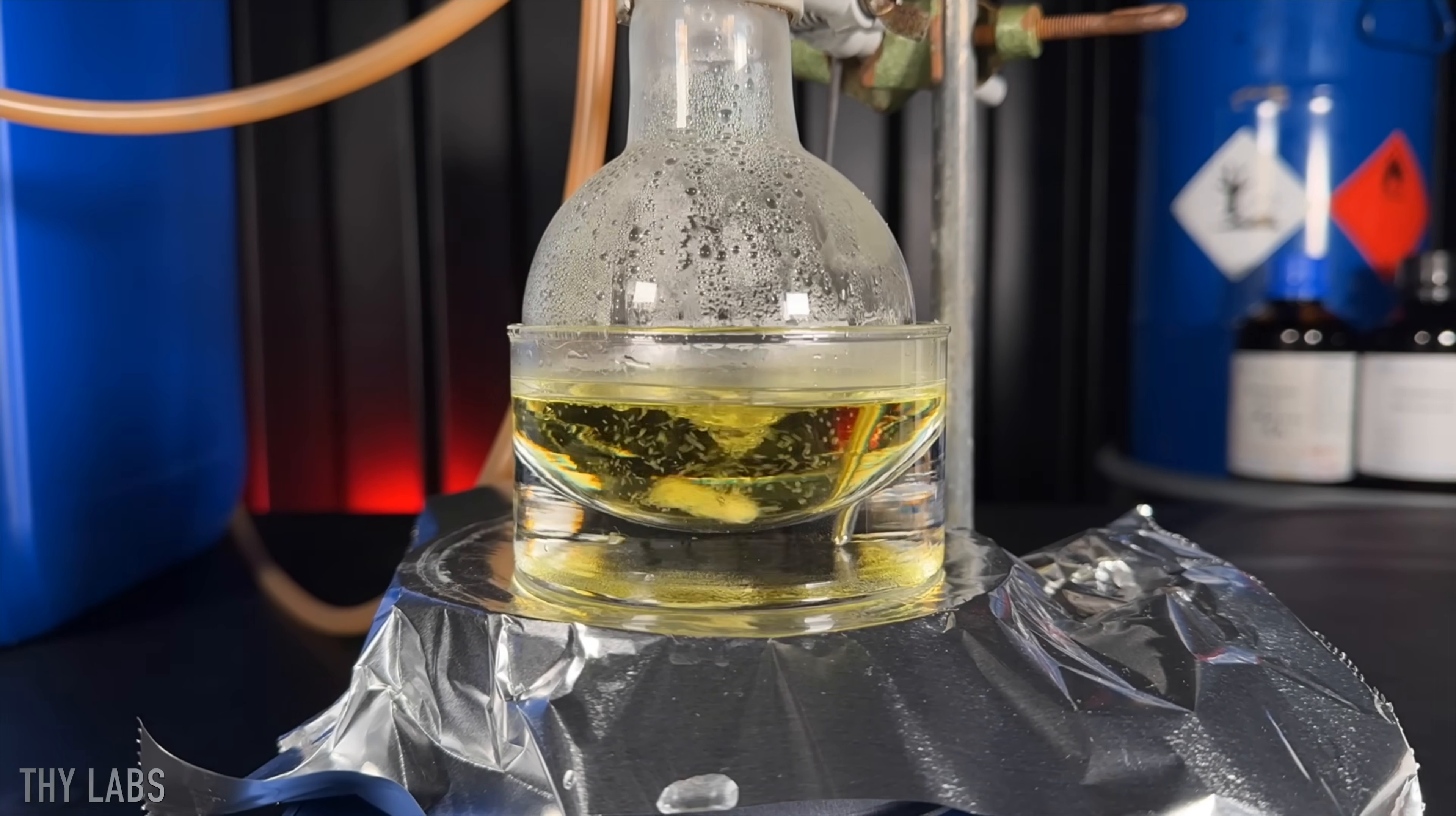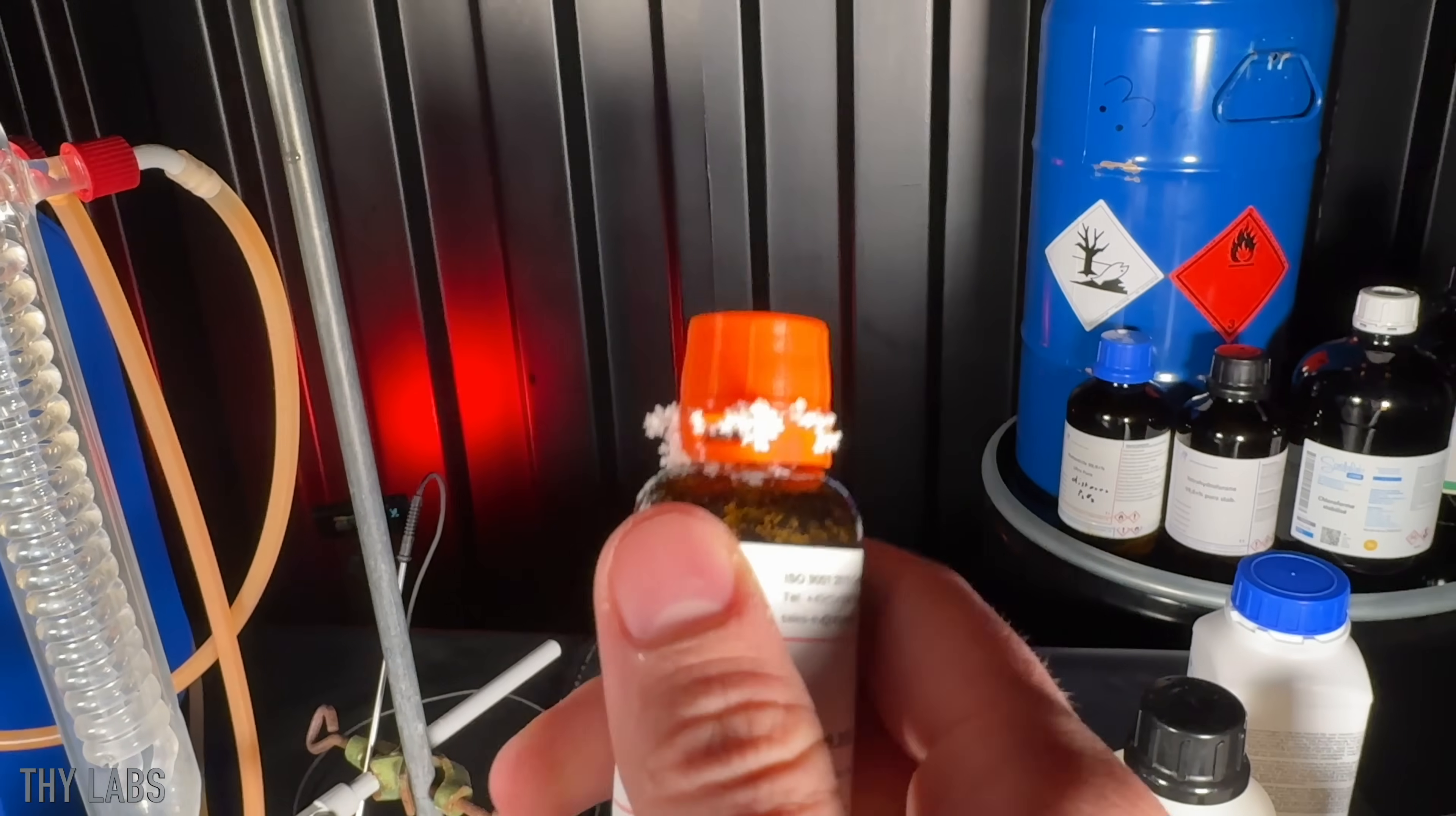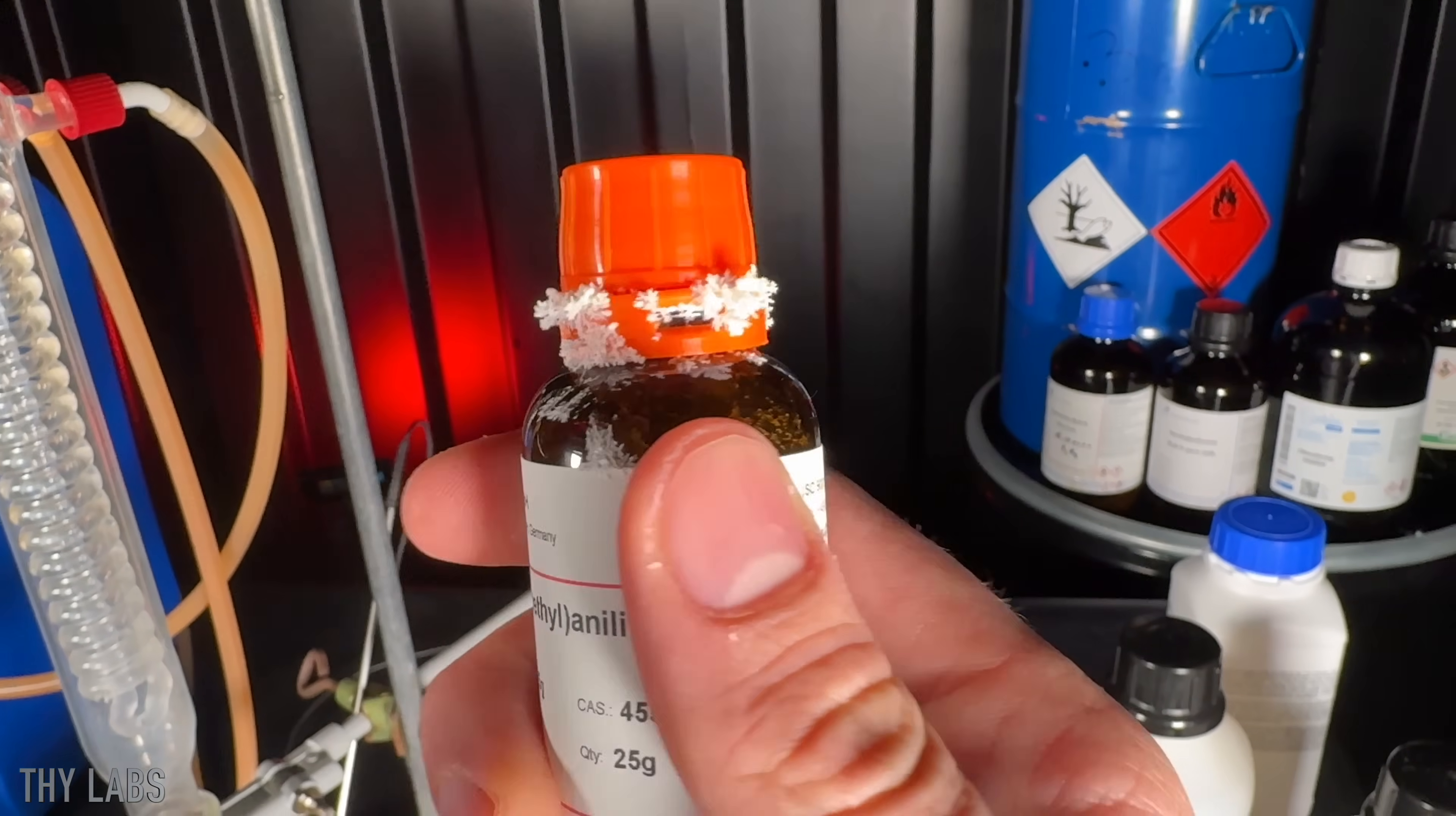What I found fascinating was that my trifluoromethylamine formed some crystals. It is likely frozen trifluoromethylamine and the carbonate salt.